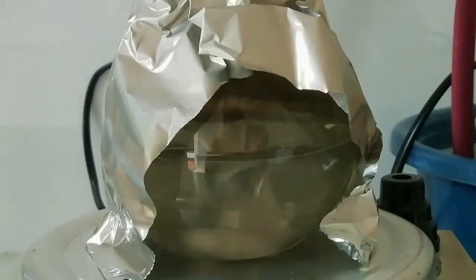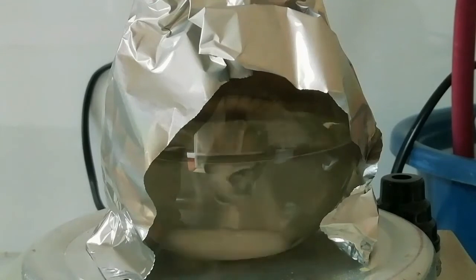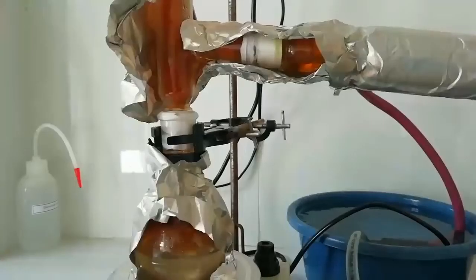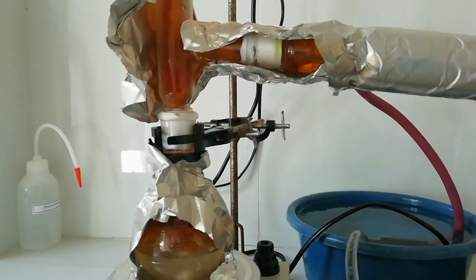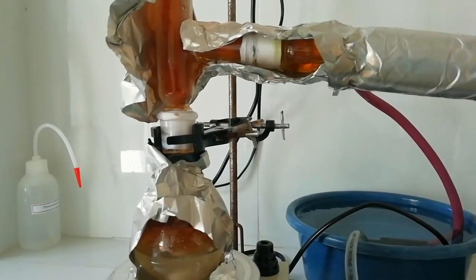I just covered the apparatus with aluminum foil because when the nitric acid fumes are generated, due to the presence of light, the nitric acid fumes will decompose to nitrogen dioxide gas. Now you can see the reaction - nitric acid fumes are coming out.